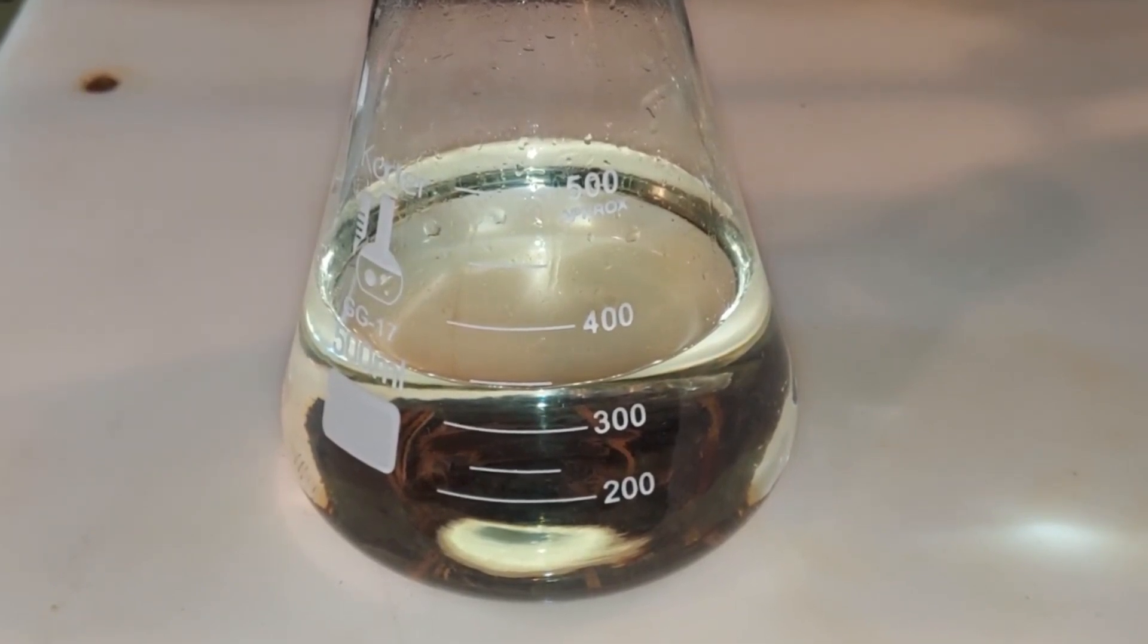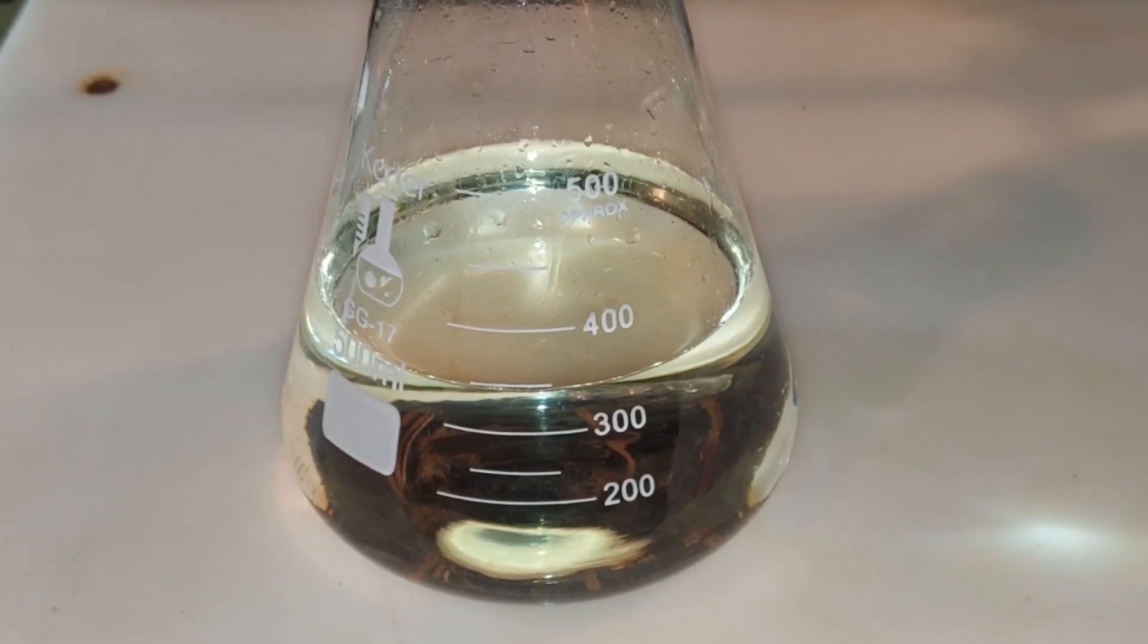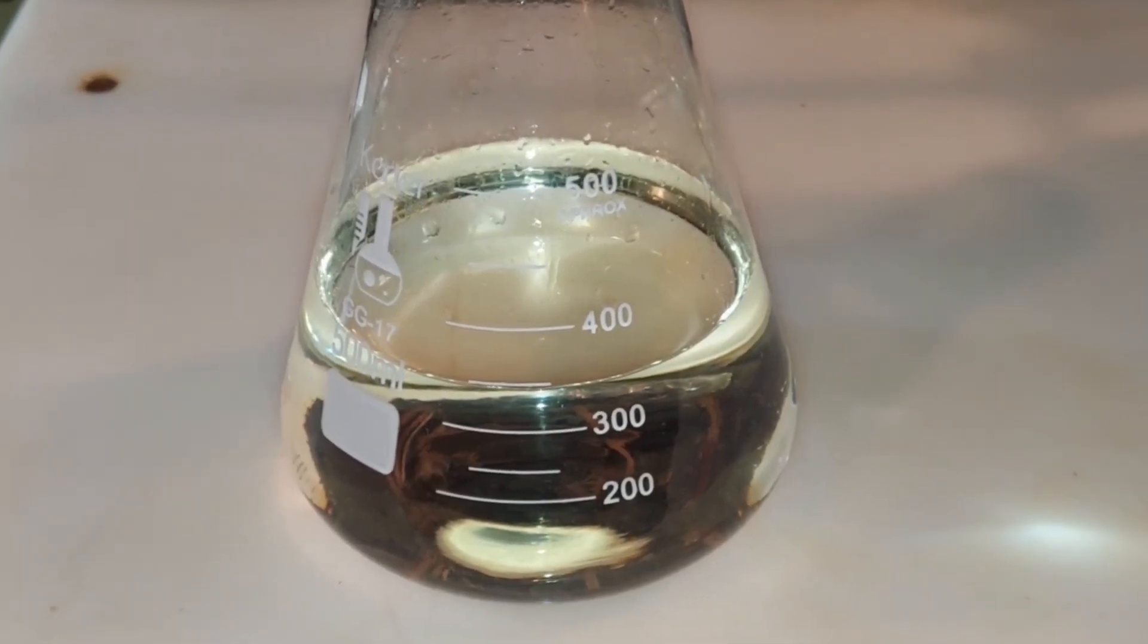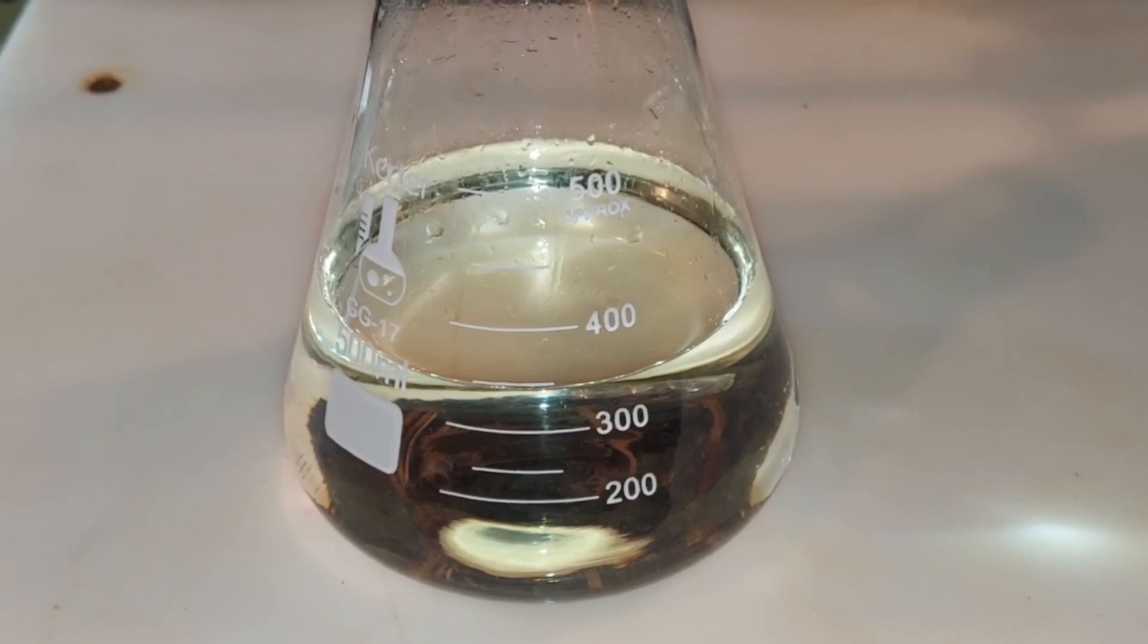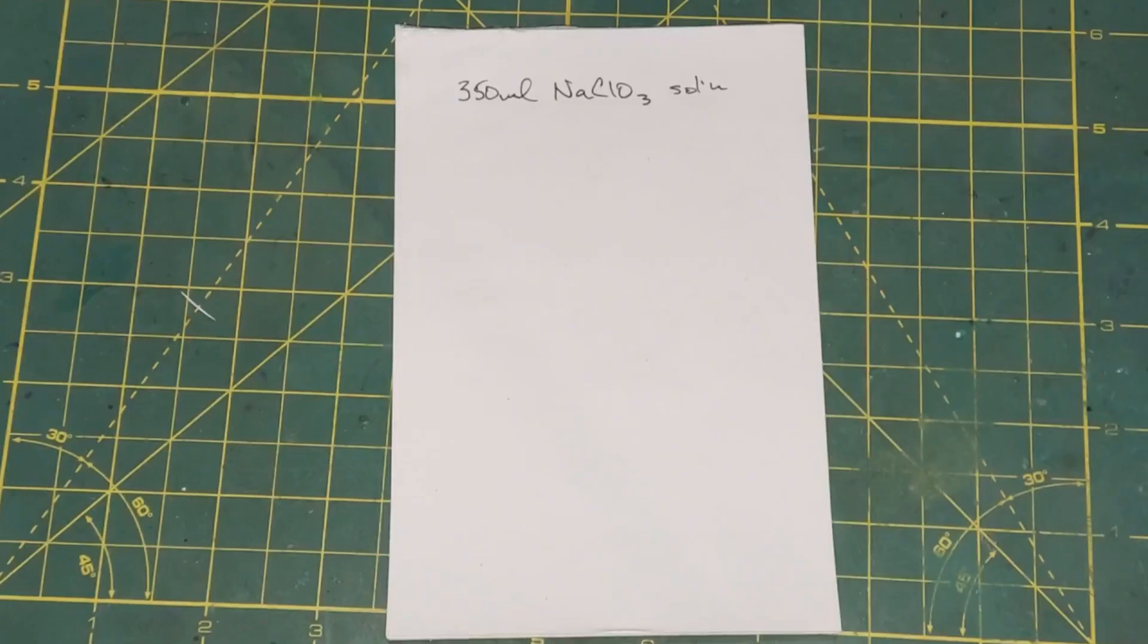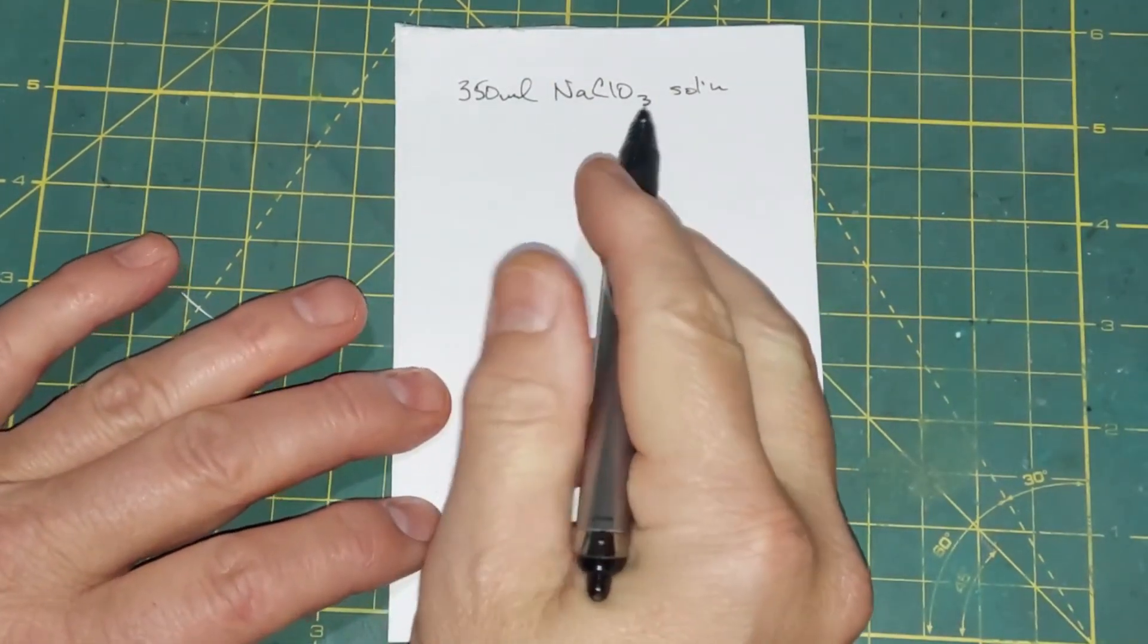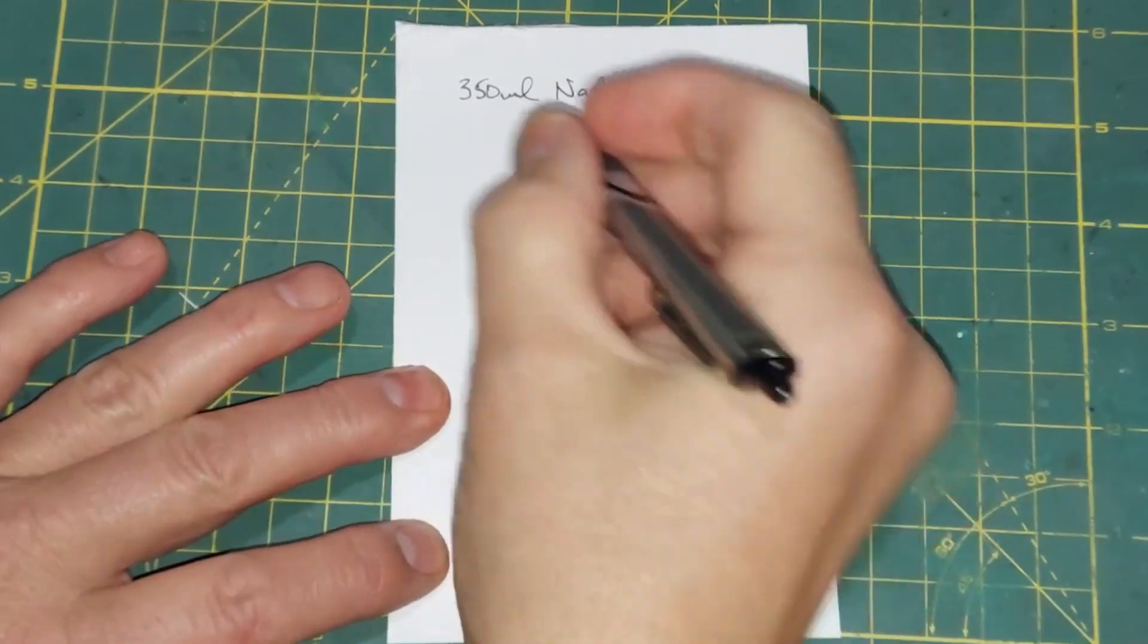Obviously the salt that was in there took up a portion of the volume in the previous beaker. Next I'll be preparing 350 milliliters of a potassium chloride solution. We know we have 350 milliliters of sodium chlorate solution, so now we need to make 350 milliliters of a KCl potassium chloride solution.